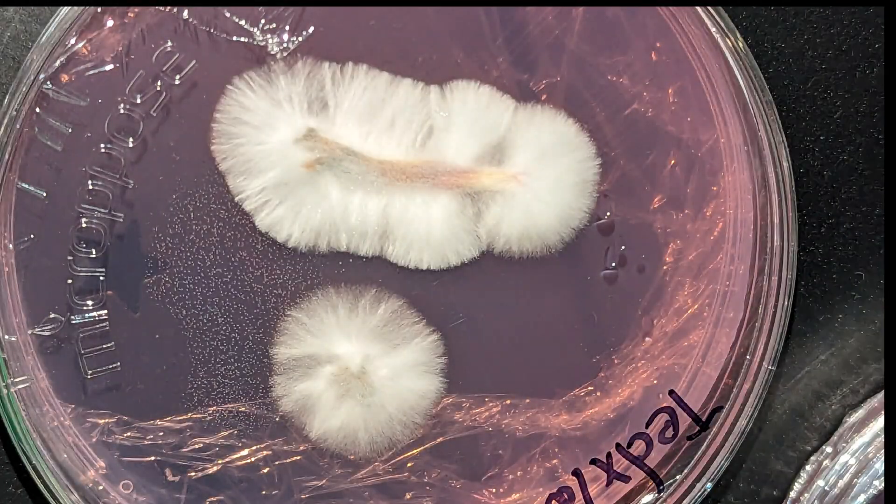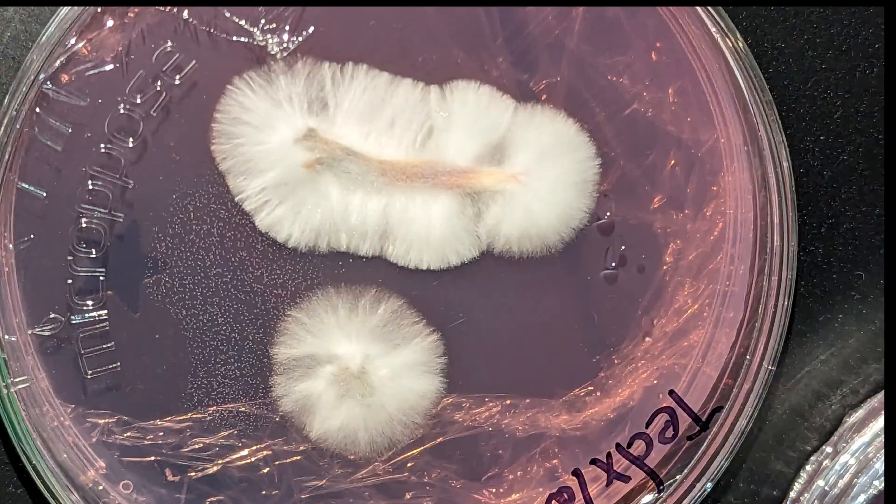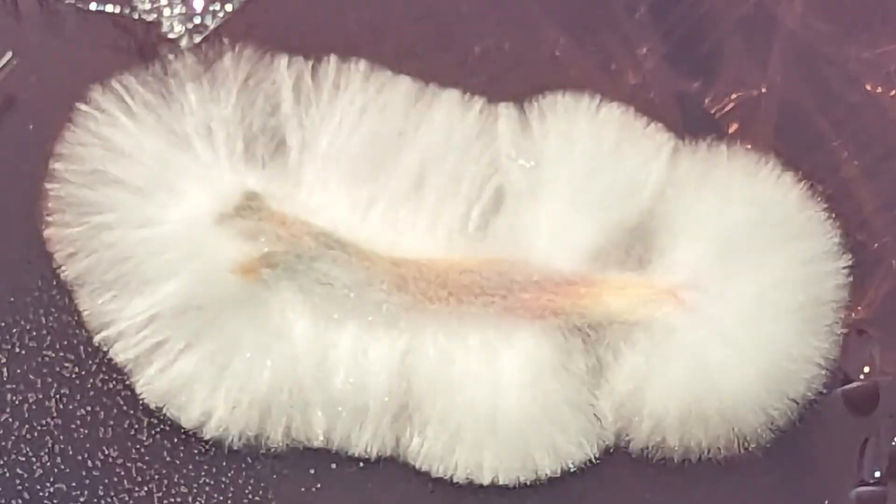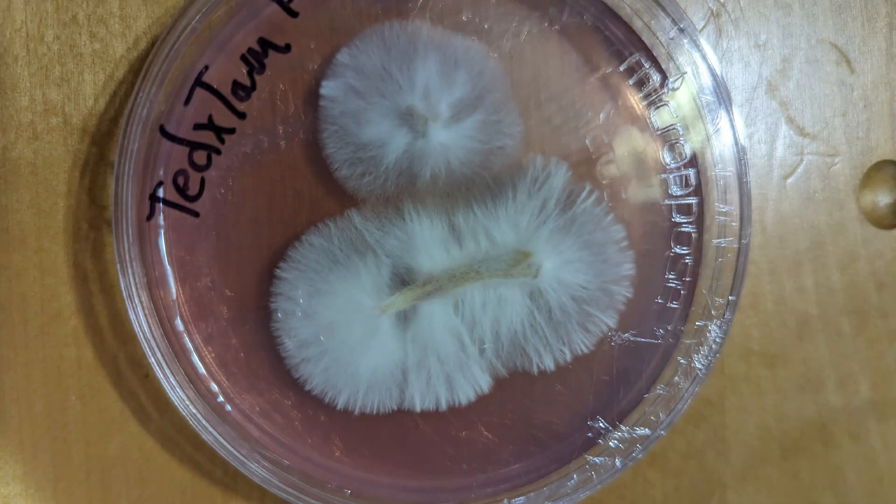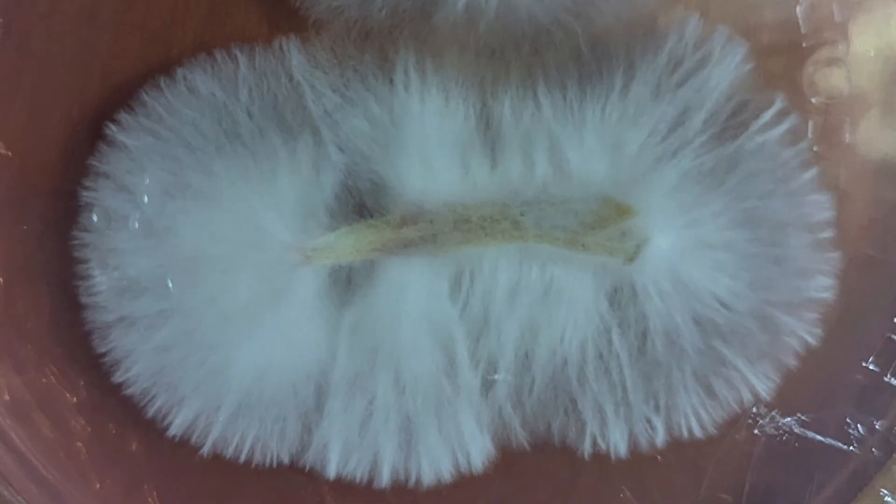Before I end the video, I'll show you the results of the cloning. This first one is the ones from the video that I just did. This is about a week after the initial cloning from the video. It appears to be nice and healthy growth. I'm gonna let it grow out some more and then take some transfers from it.